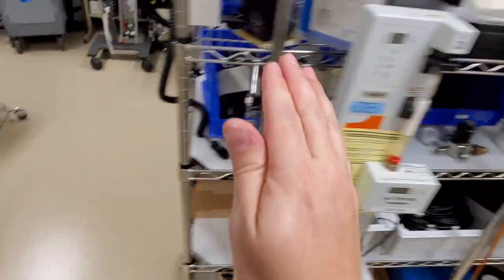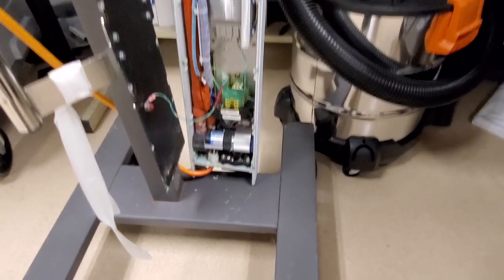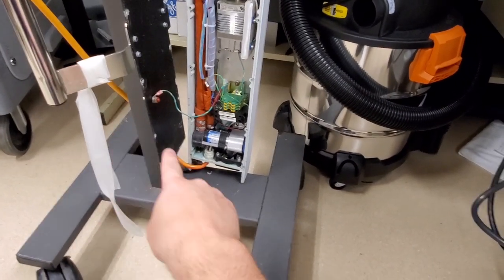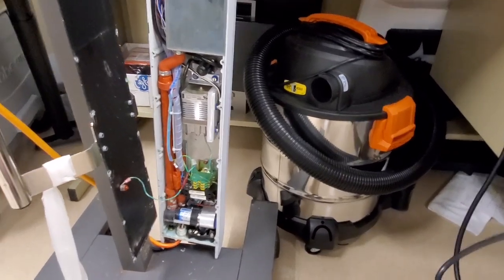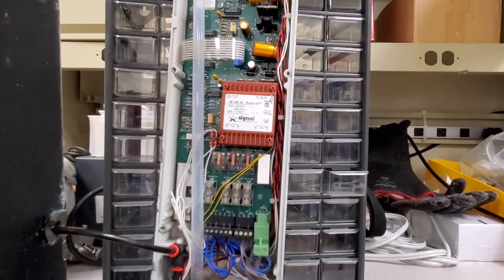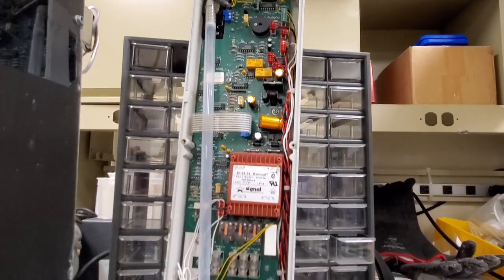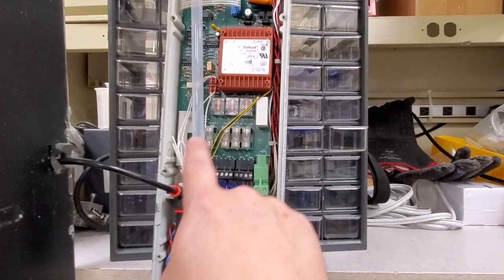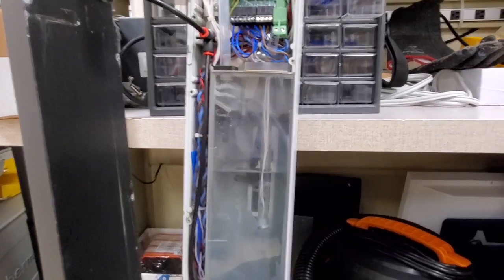Let's take a look at the inside of one of these guys and see what makes them tick. So you can see right here, AC power comes in, goes through an industrial fuse setup and then it comes up here to a power supply slash control board. It's all in one board on these guys. It does have a series of fuses. I've never had to change out a fuse in these, but we have had many leaks.